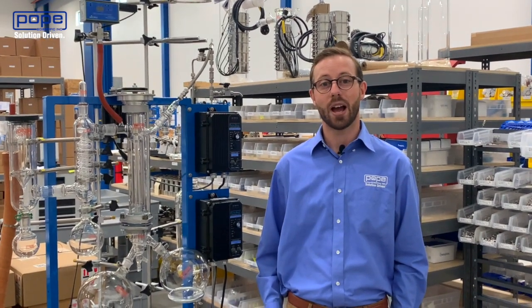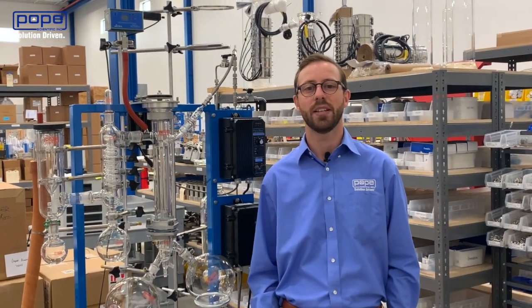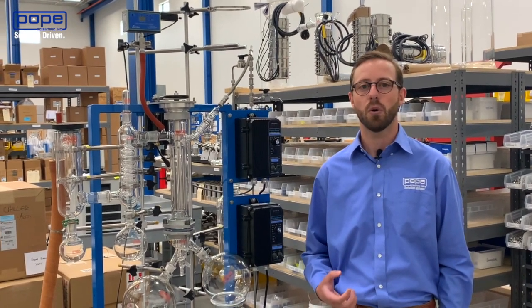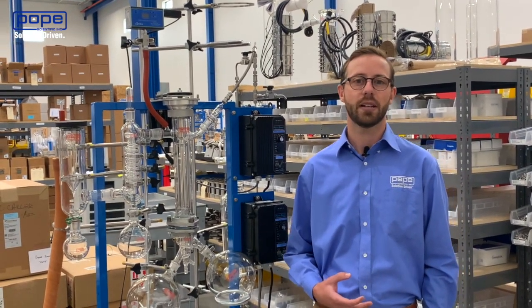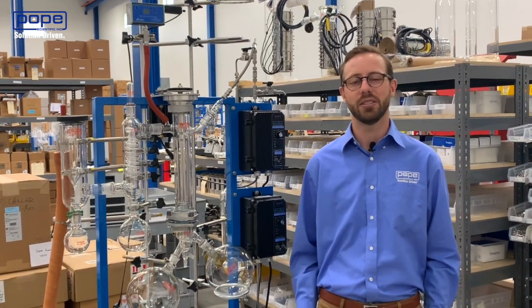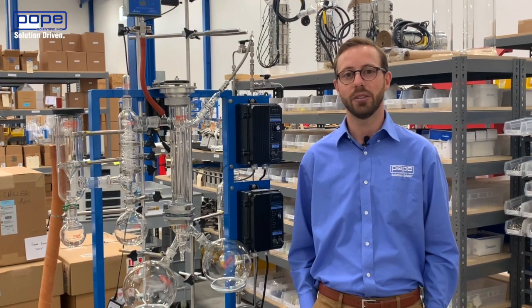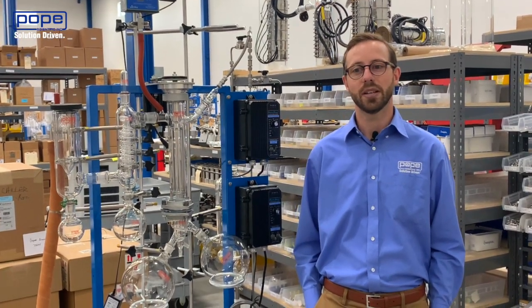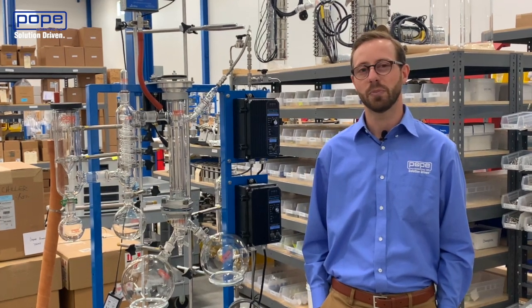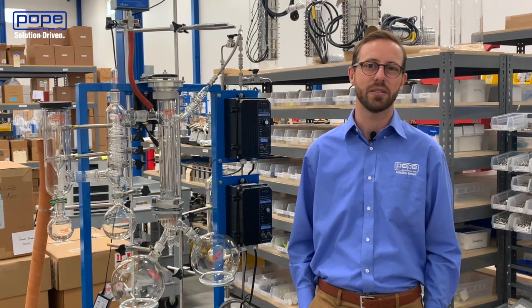Often when vacuum issues arise, users of wipe film stills attempt to compensate. They can either run their still body at higher temperatures, try to slow down the process, or get very complex and expensive vacuum systems. Realistically, this can work for you; however, it's not the ideal way to process. If you are using the ideal process, you'll end up with a much better product. To do this, we recommend that you always consider multiple passes when you have materials that have a boiling point difference of probably about 30 degrees Celsius or larger.